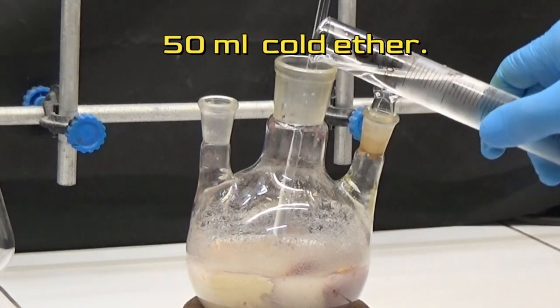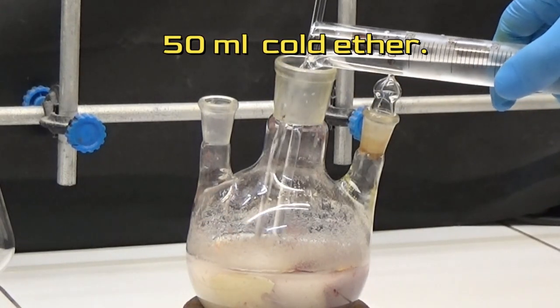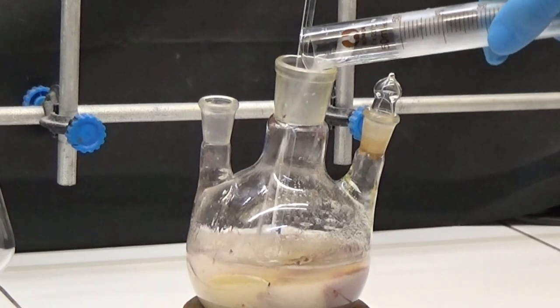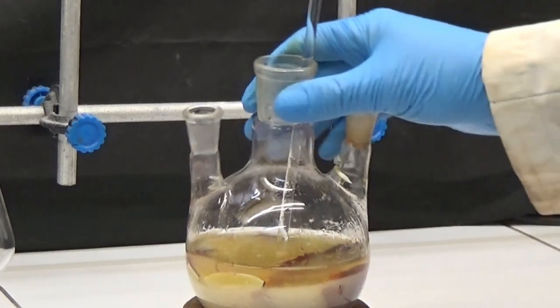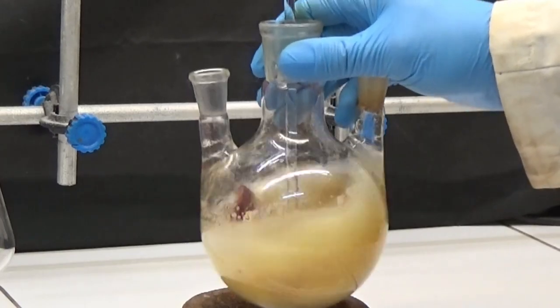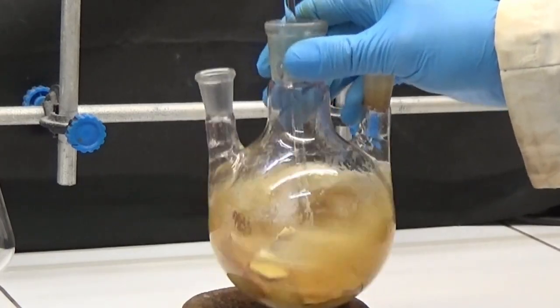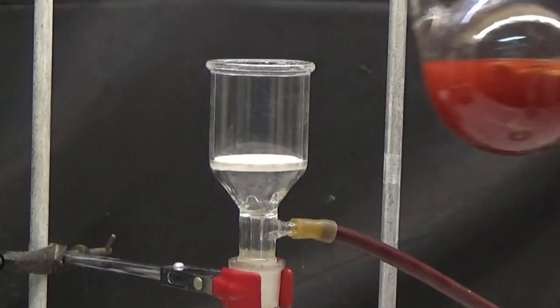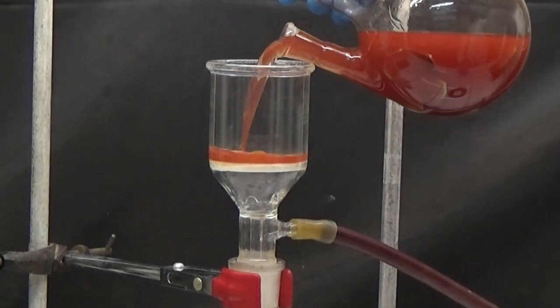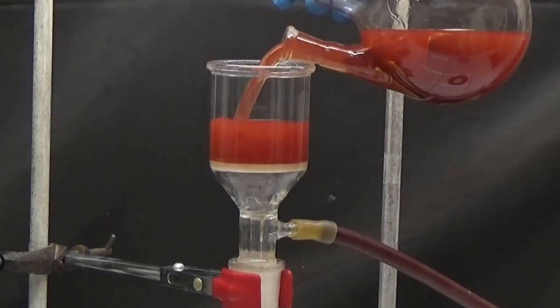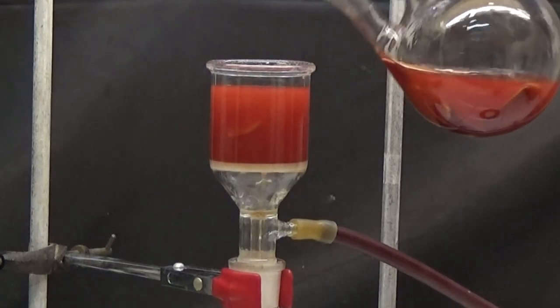Add 50 milliliters of cold ether. Filter the contents of the flask by suction to eliminate the non-reacted phosphorus. 4.2 grams of phosphorus were recovered.